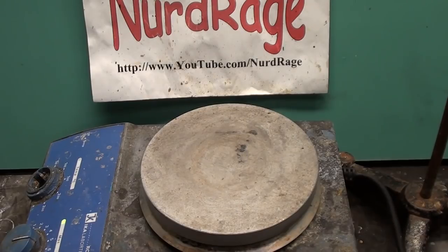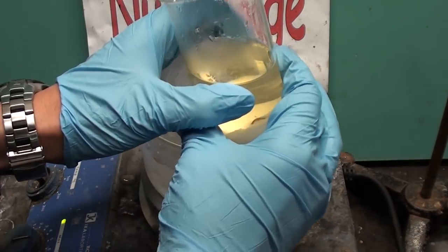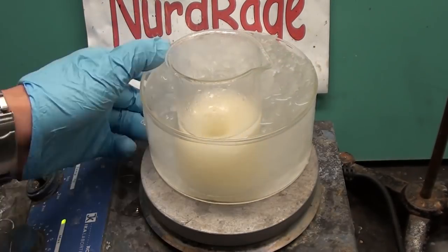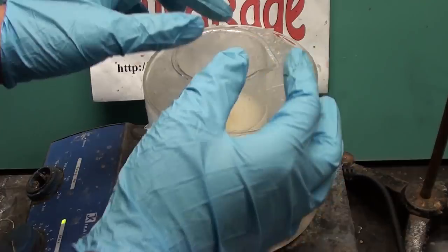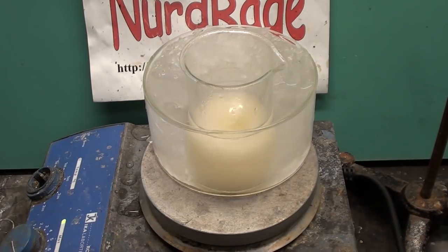After about an hour of heating, another improvement was to directly chill the solution with ice to 0 celsius. The colder temperature helped to squeeze more crystals out of the solution.